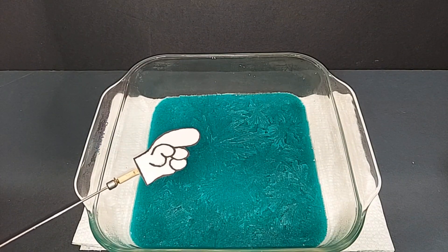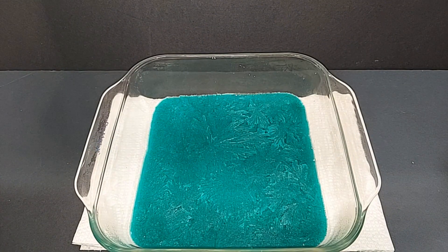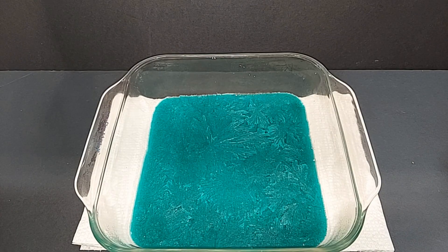And here's our nickel nitrate hexahydrate finally. That solution was pretty saturated. I don't see any liquid anywhere. It looks like it dried up really well, so I'm going to next break this up.